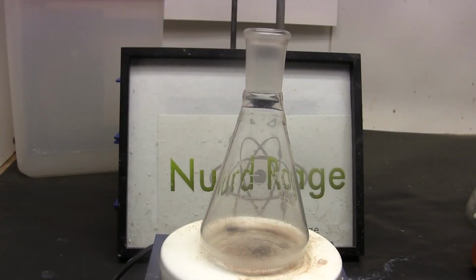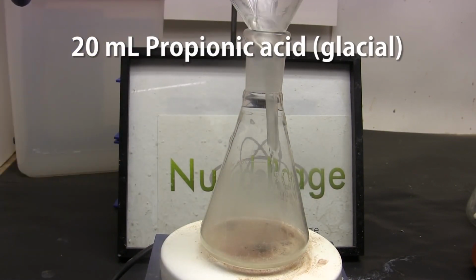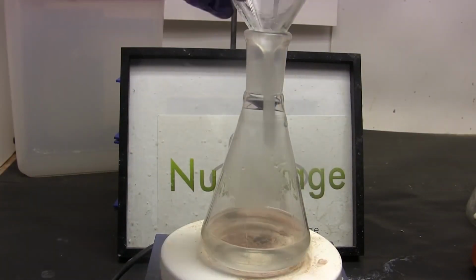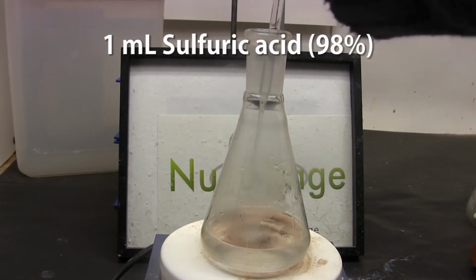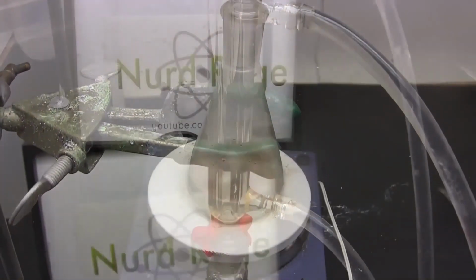First, we start with an Erlenmeyer flask and add in 20 milliliters of propionic acid. Then we add to that 50 milliliters of dry ethanol. Finally, we need an acid catalyst, and we'll use 1 milliliter of concentrated sulfuric acid. Now we set up a reflux apparatus on top of the flask. Gently start refluxing the mixture.